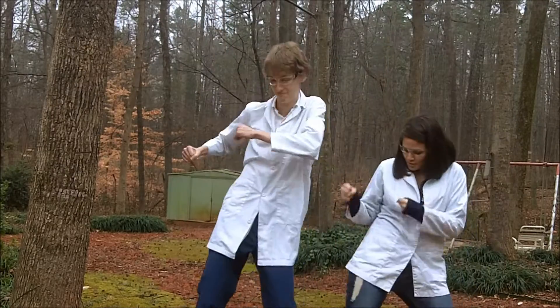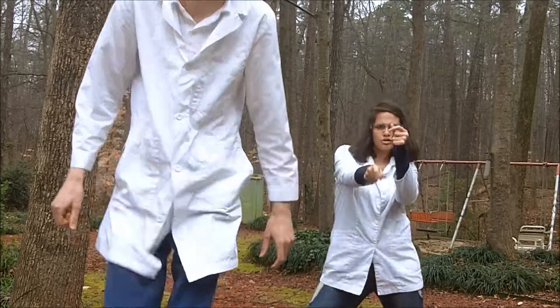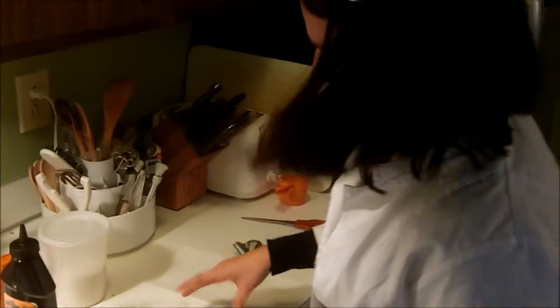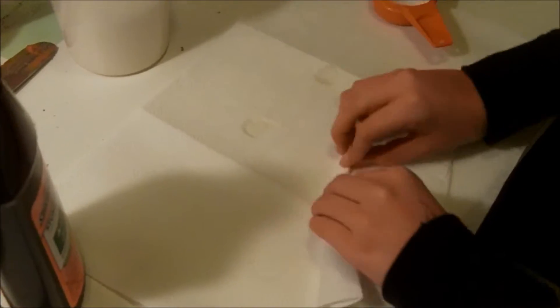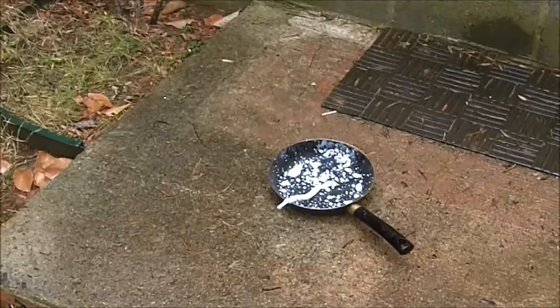That's amazing — ew, look at the leftovers. So what we're doing is making our wick. I use a piece of tissue and mix some potassium nitrate and sugar together at the same ratio — five to three — placing a little bit in the middle of the tissue. Fold it in half and just keep rolling and twisting.